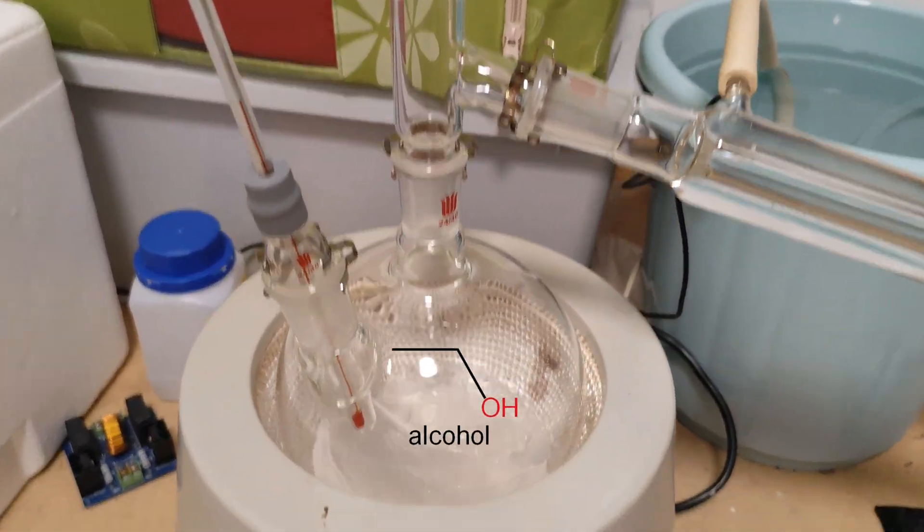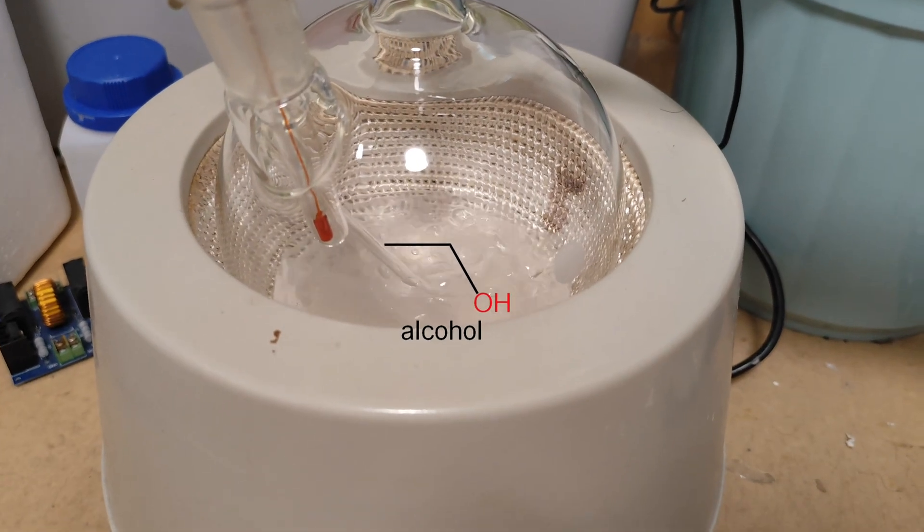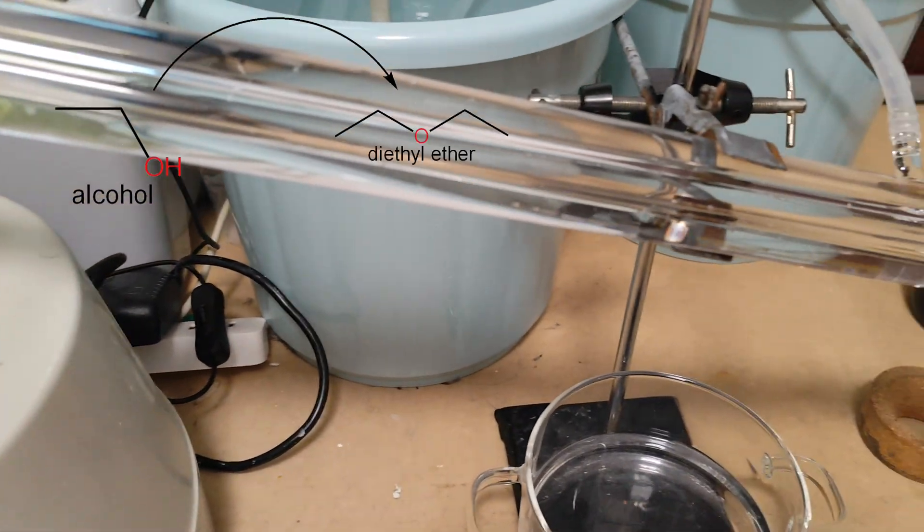I'm Kami Chiu. Just about a few days ago, I made some anhydrous alcohol, and I just want to make some ethyl ether, simply because it looks cool. But anyway, let's first begin with the reaction mechanism.